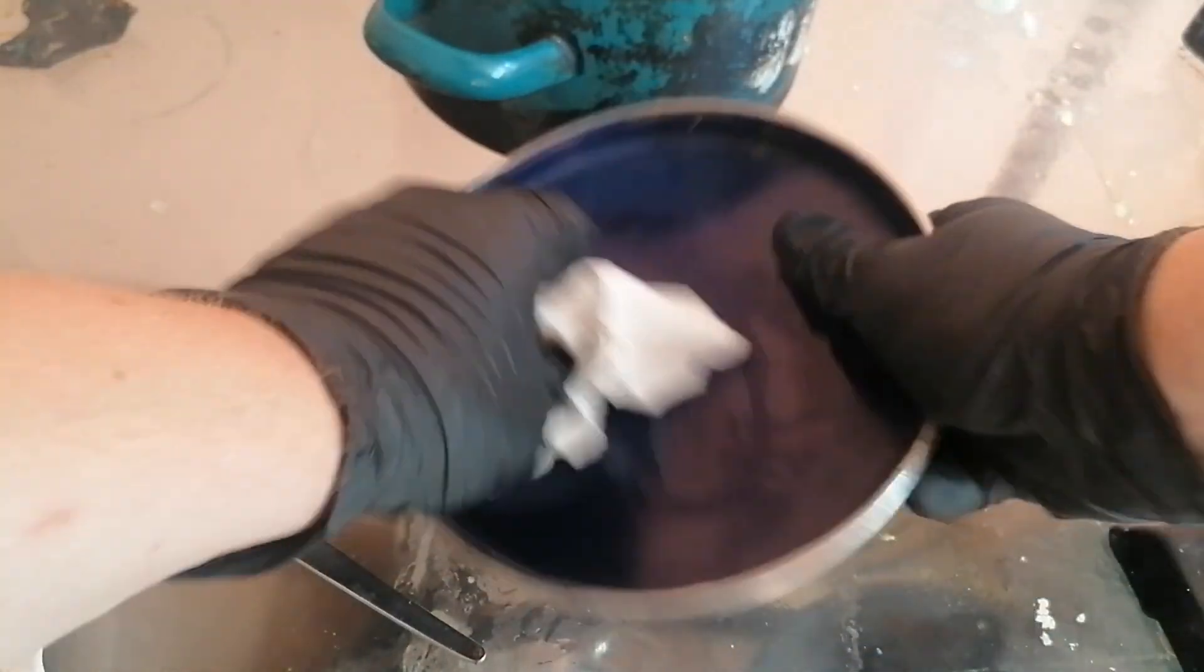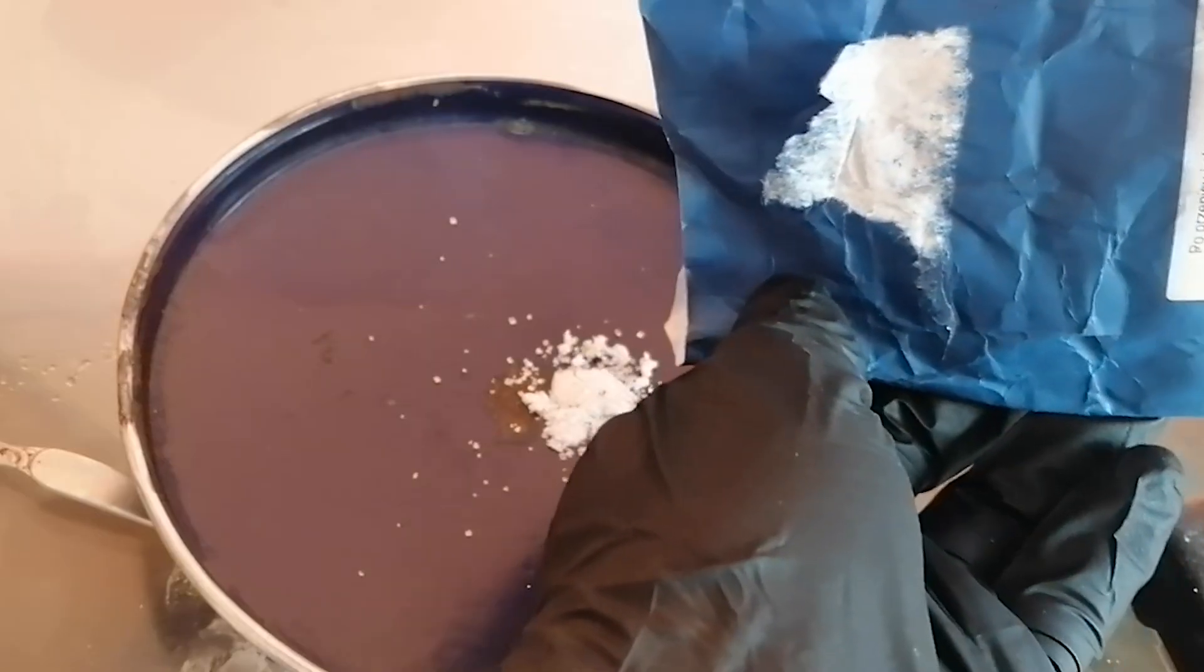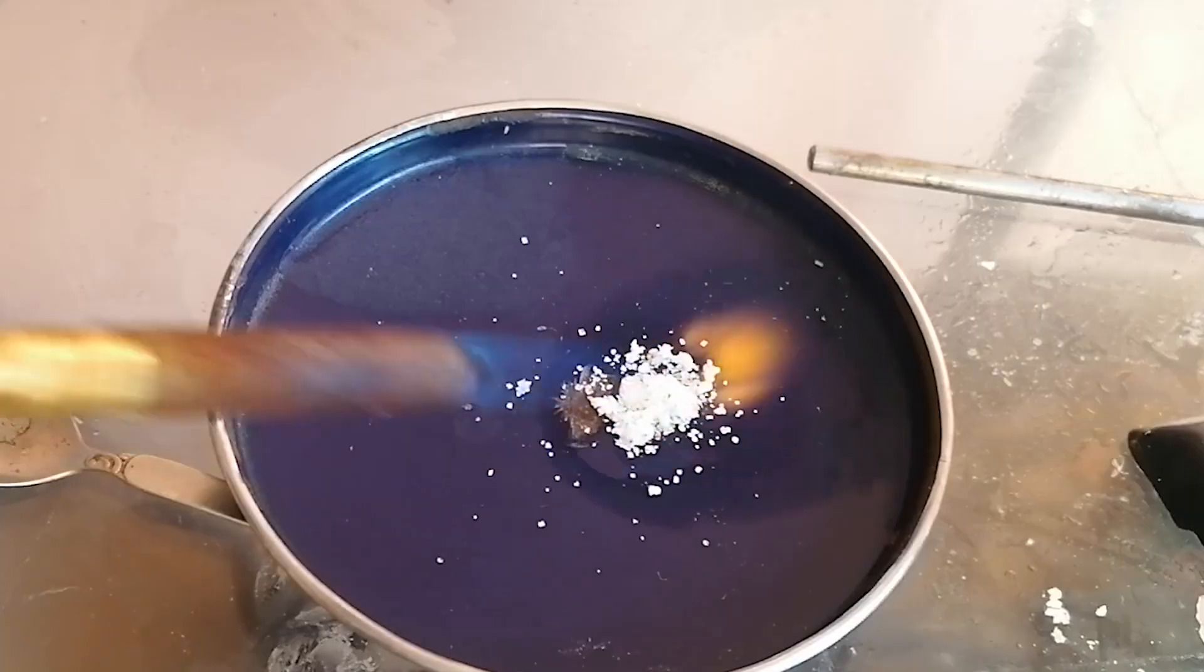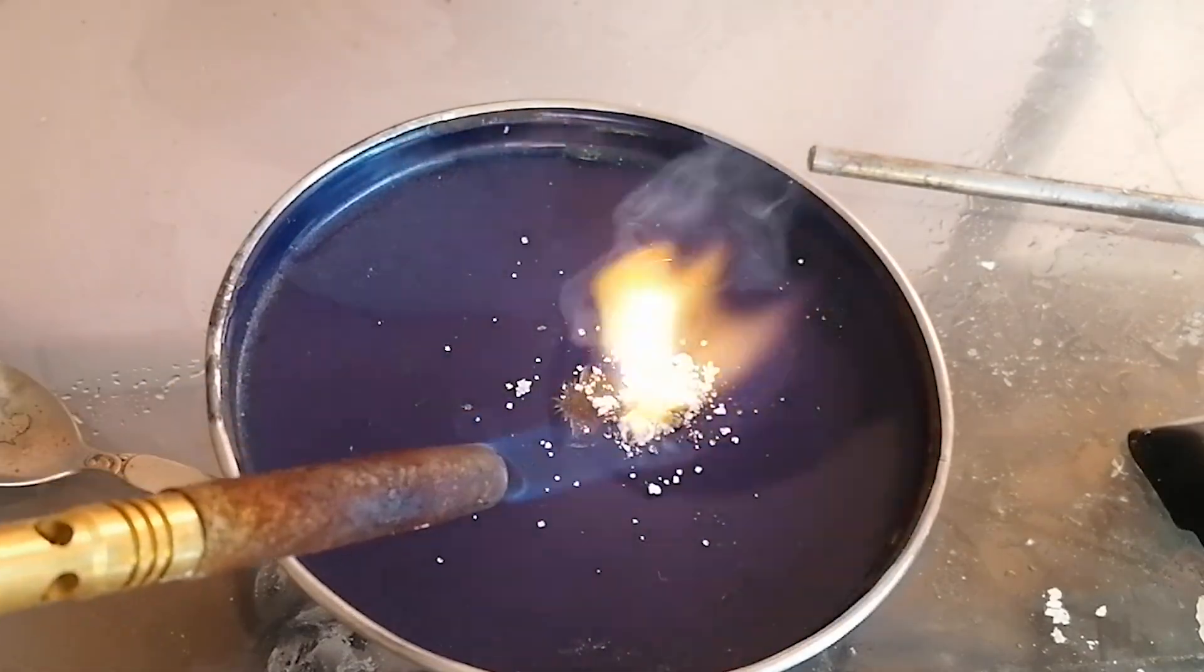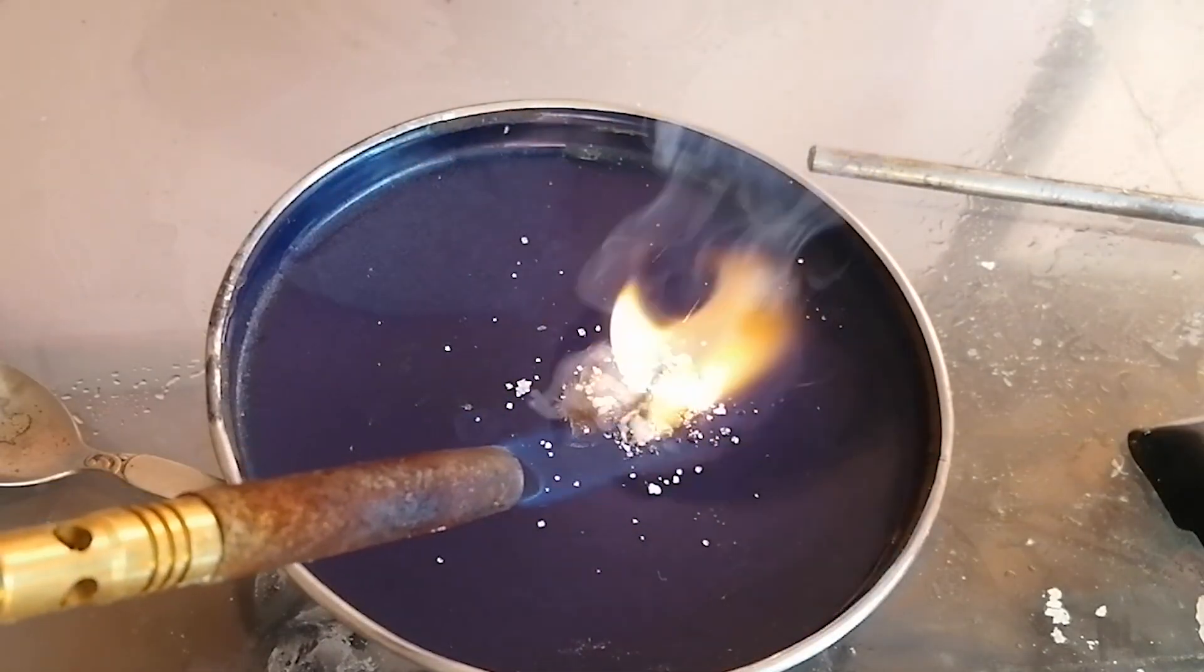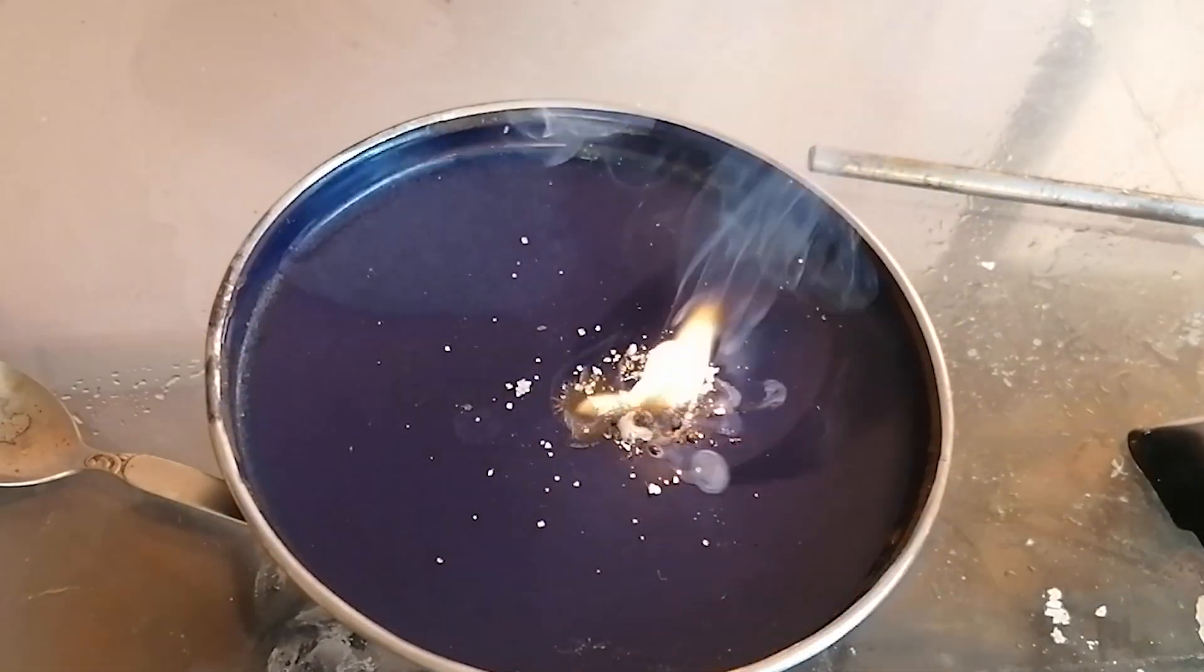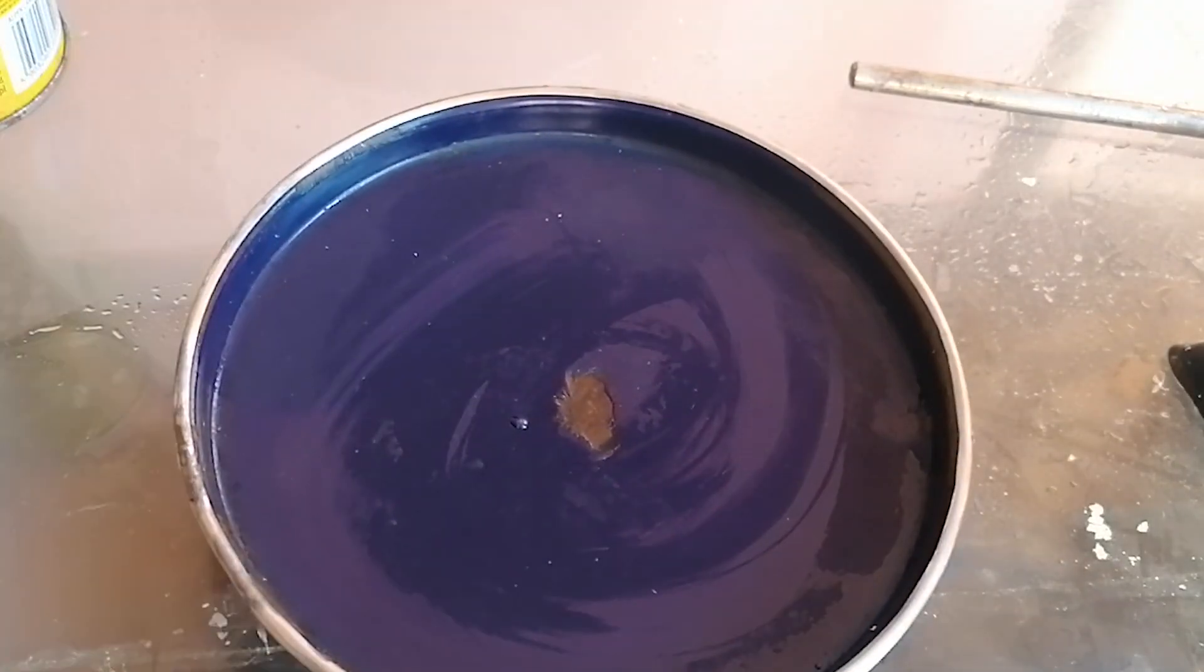Now that the chlorate is powderized, let's test it by adding it to some sugar. You can see here it's pretty underwhelming, but that's mostly because sugar here is in the form of really small sugar crystals which just don't burn really well. Now let's test it with some real stuff.